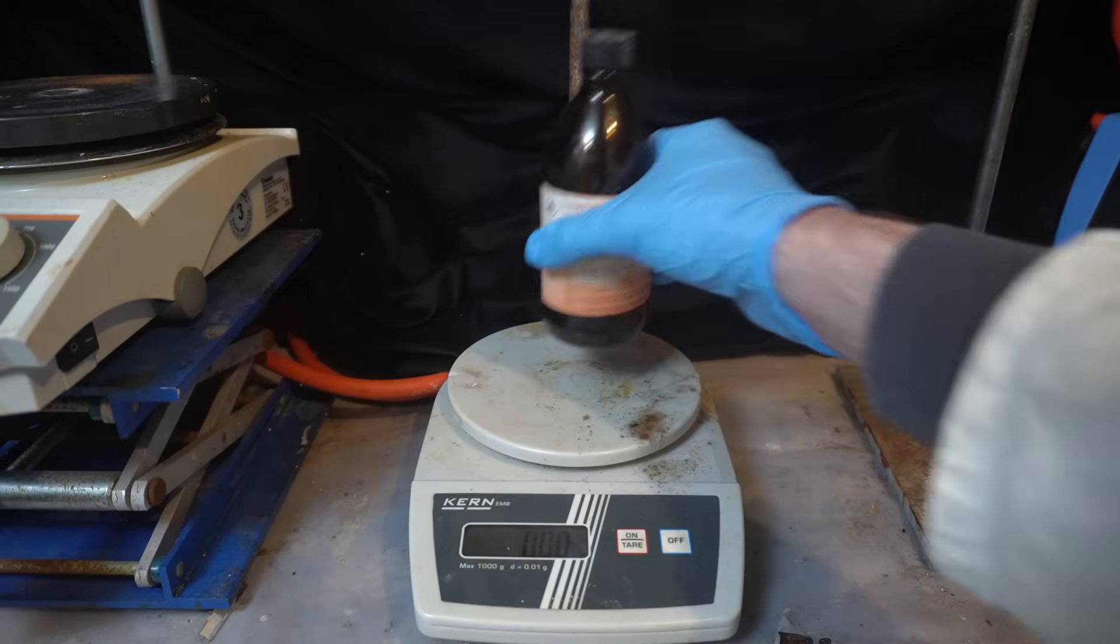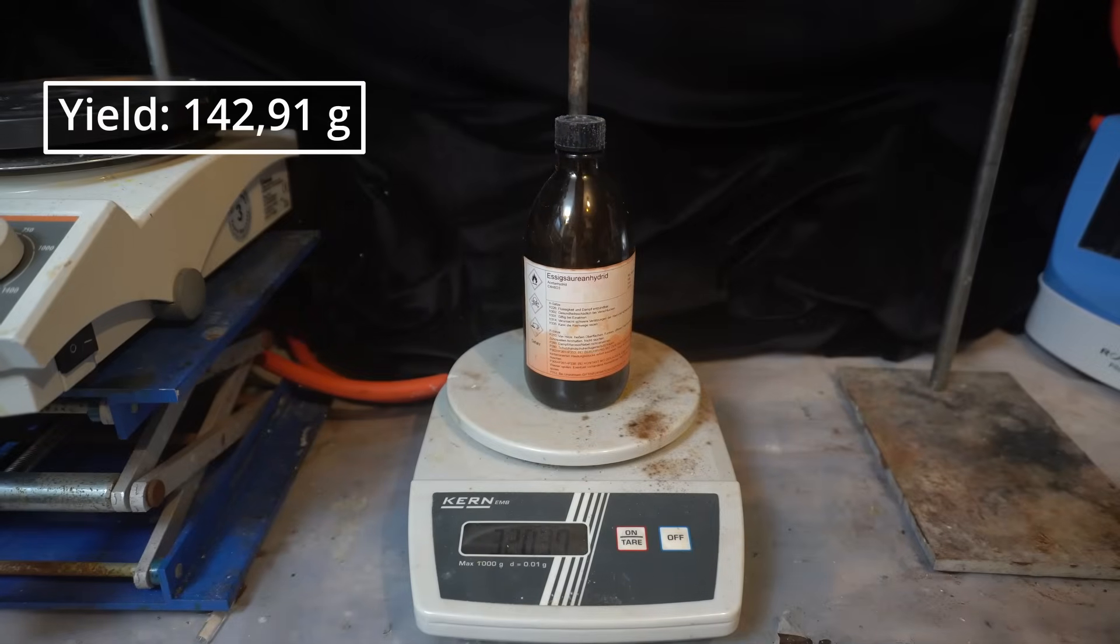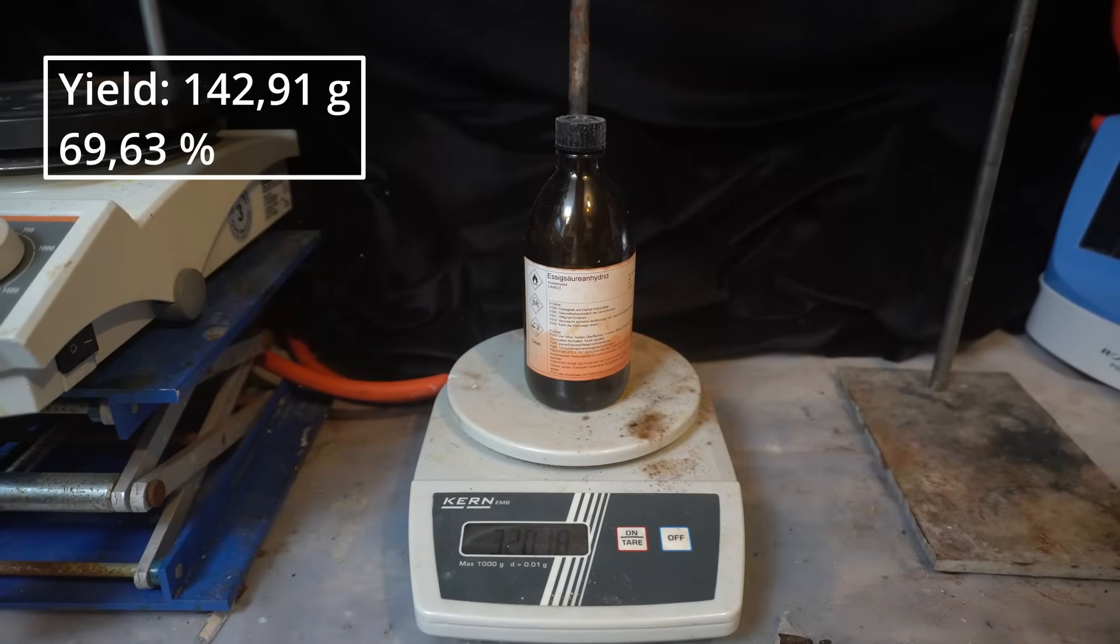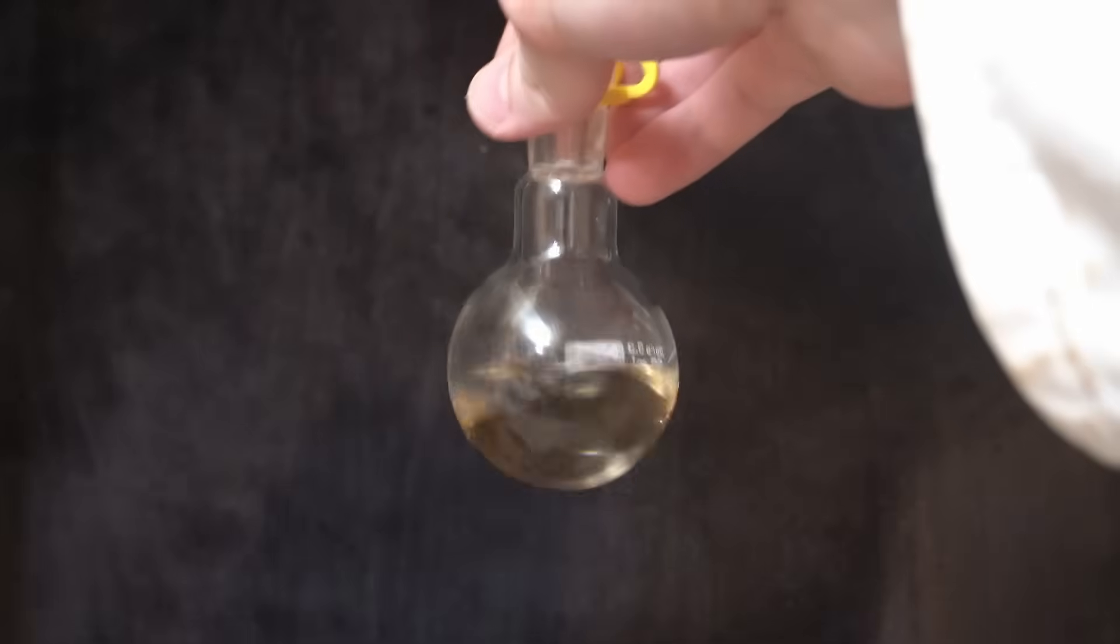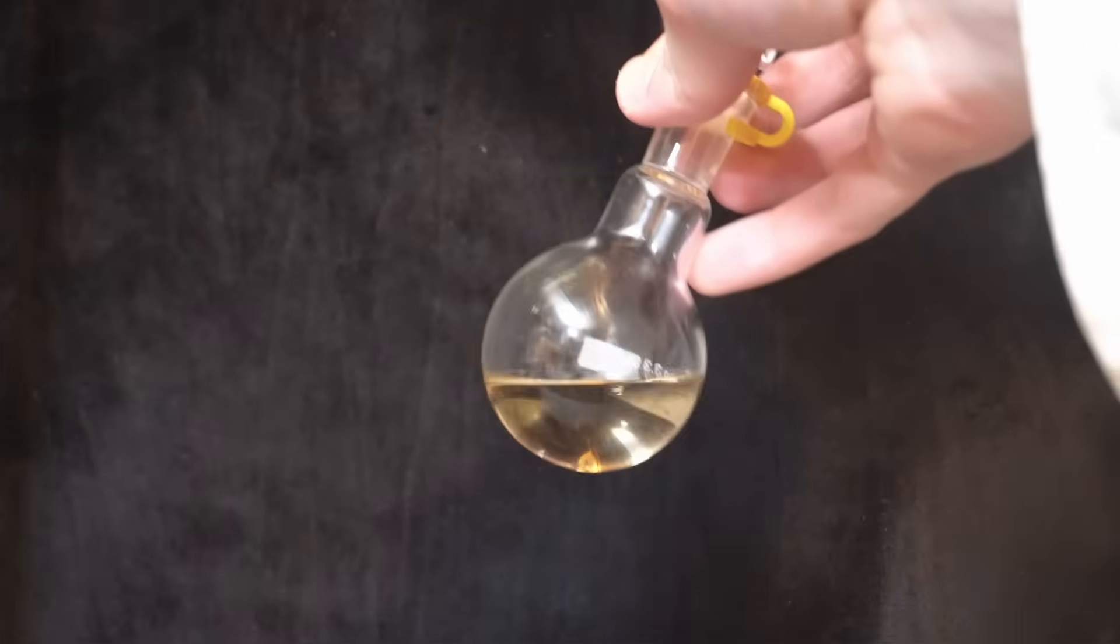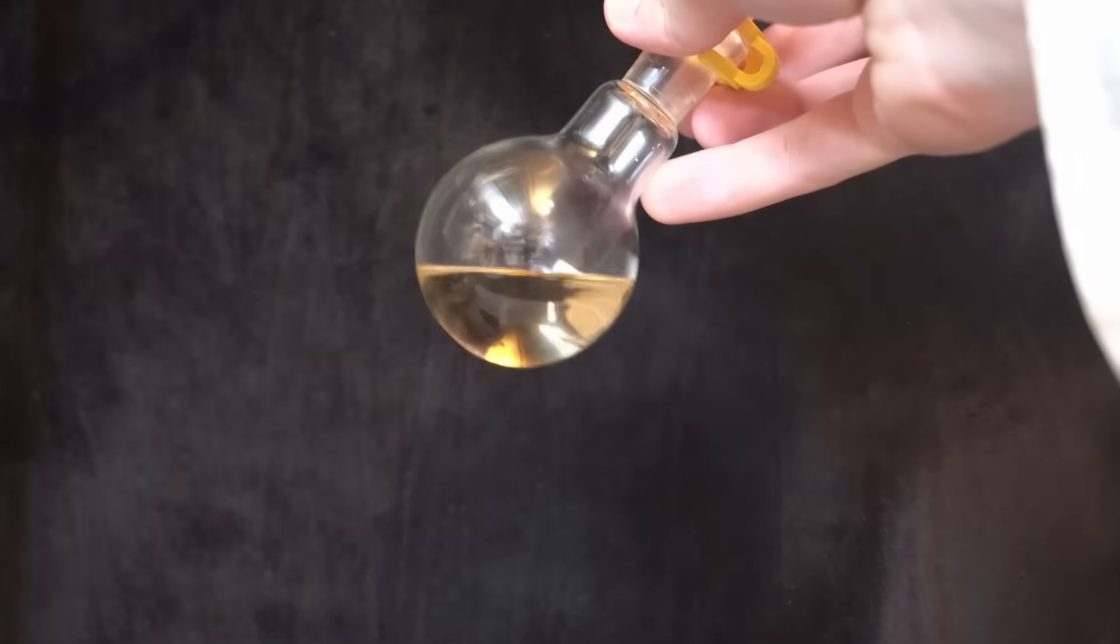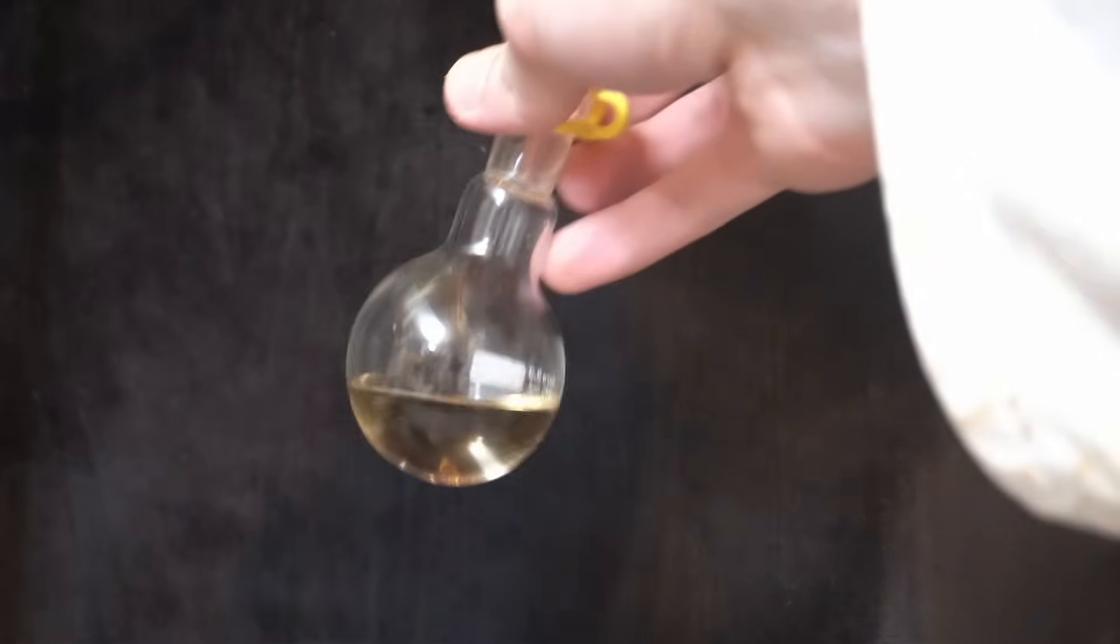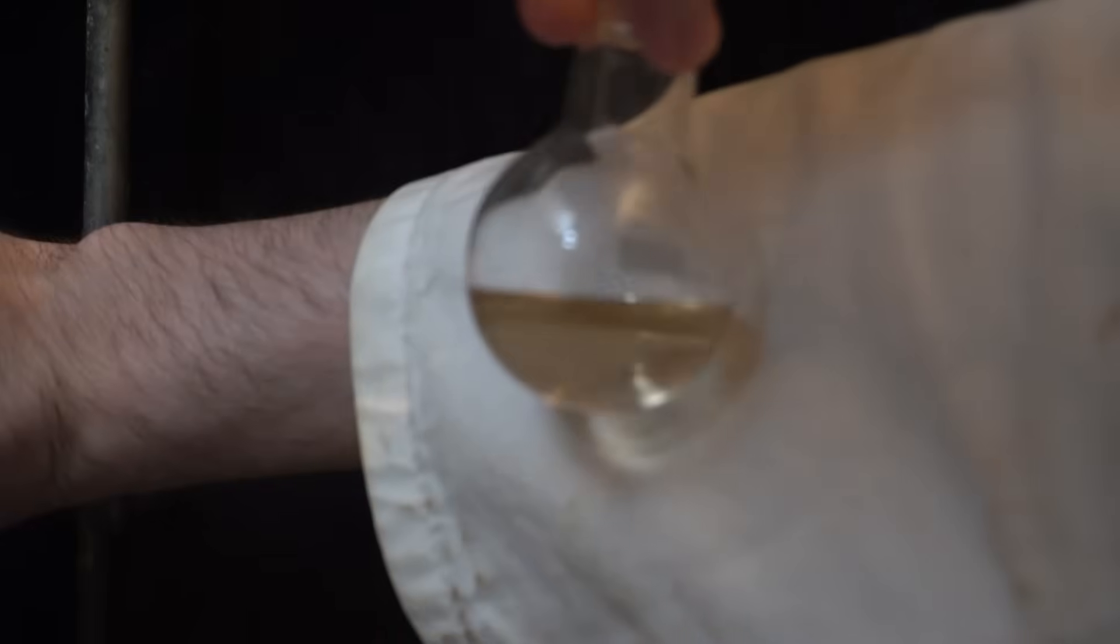The amount of pure anhydride collected is 142.91 grams, which is a 69.63% yield. If we also include the impure fractions in this calculation, it's actually 80%, which is pretty good. Although these fractions will not be put in the storage, they still contain a considerable amount of acetic anhydride, and it would be a shame to just toss them away.